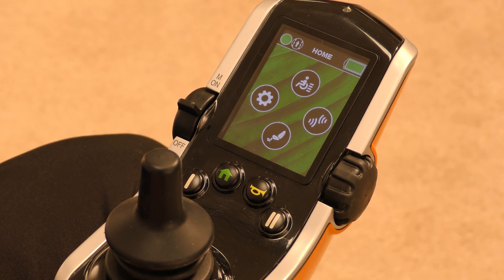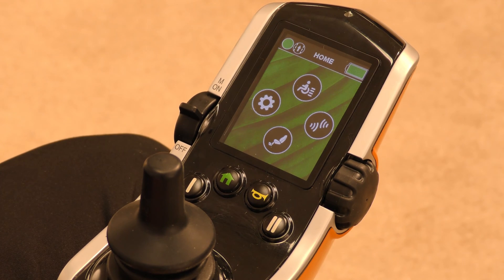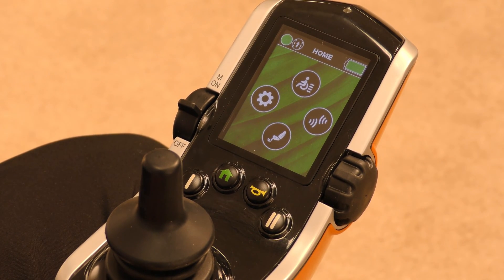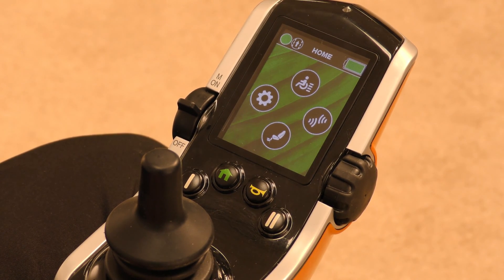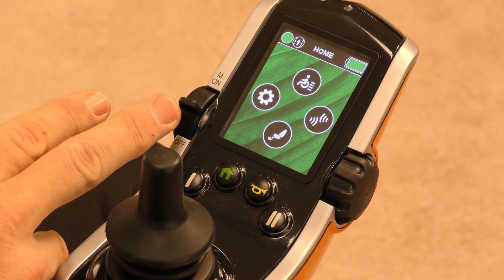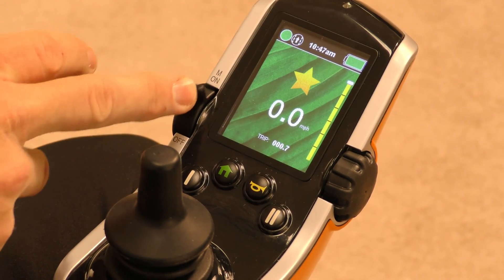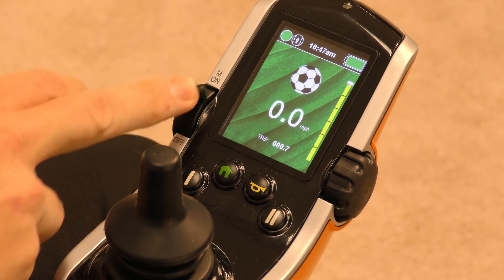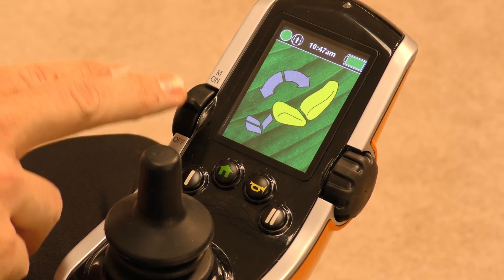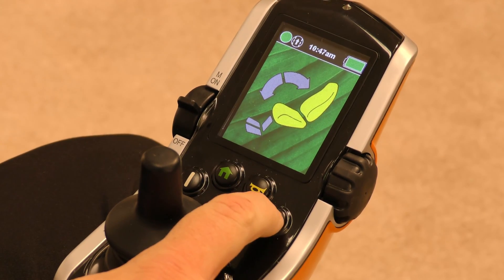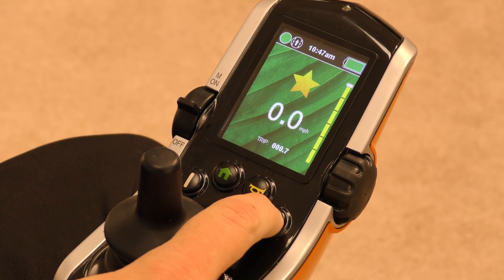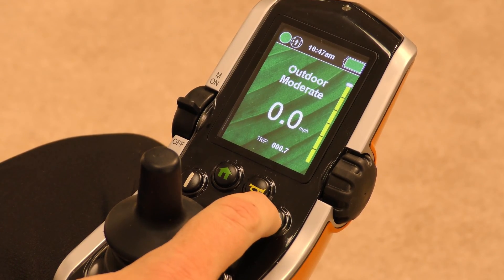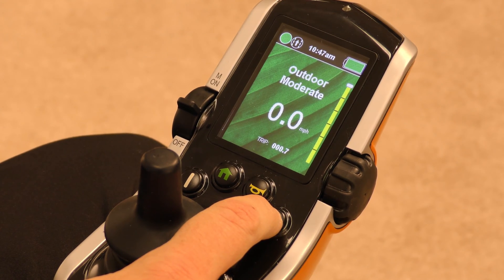If the individual does not like going to their seat profile, we could program the one button to control tilt instead. Another custom function that can be programmed is mode previous — so you go to the following mode with a forward command on the on-off toggle, and you can go to the previous mode with the two button because it's set as previous mode in the custom programming for that button.